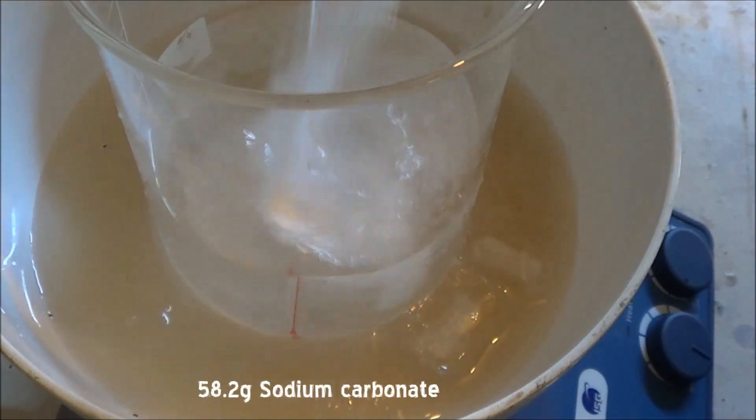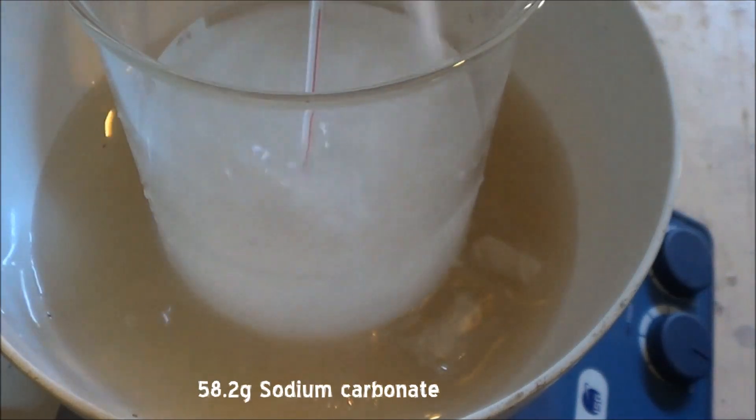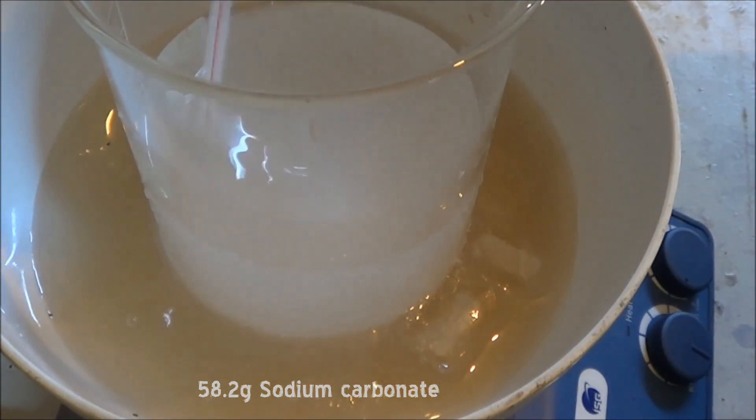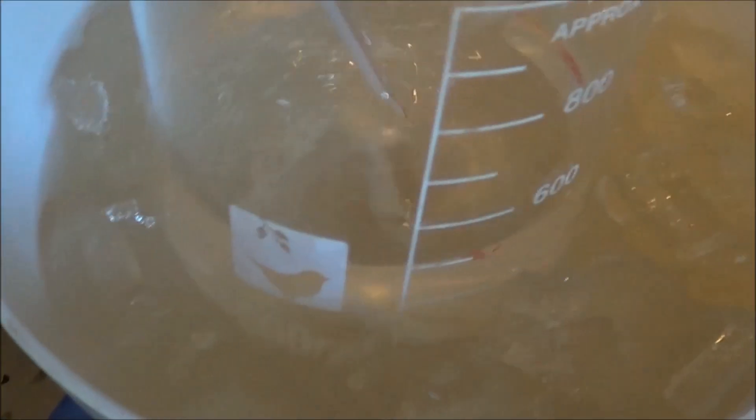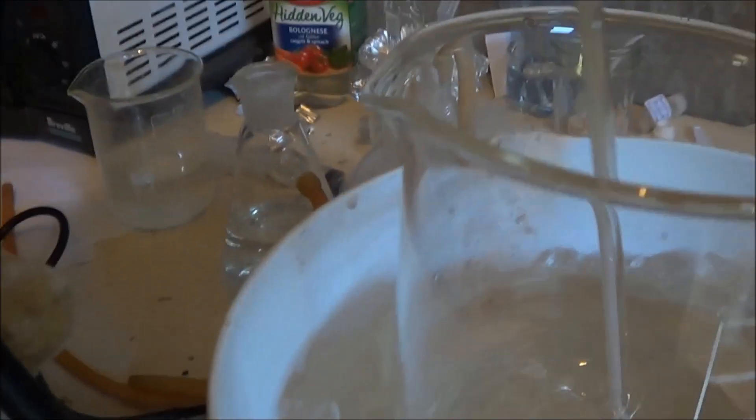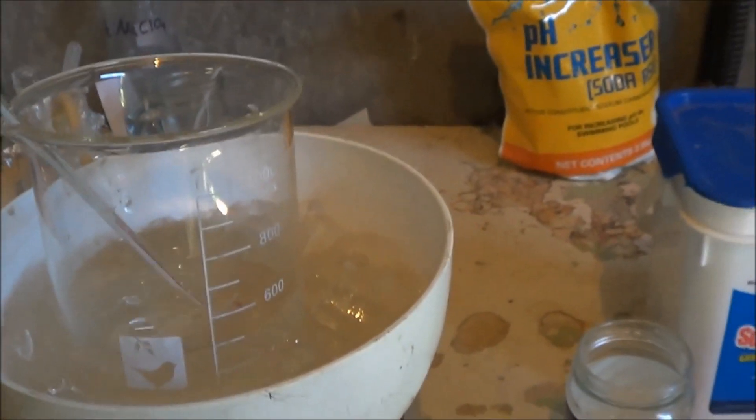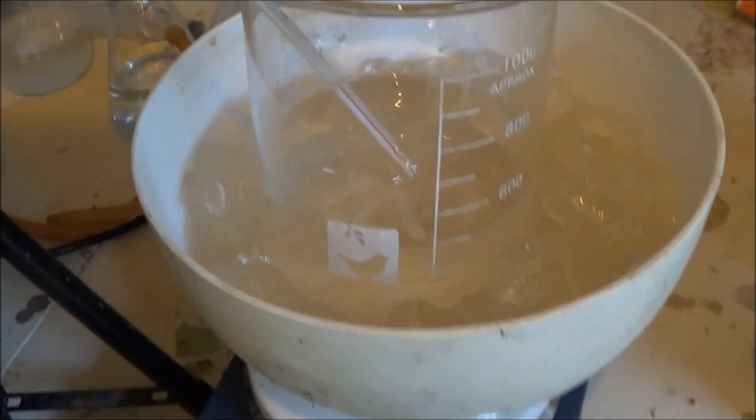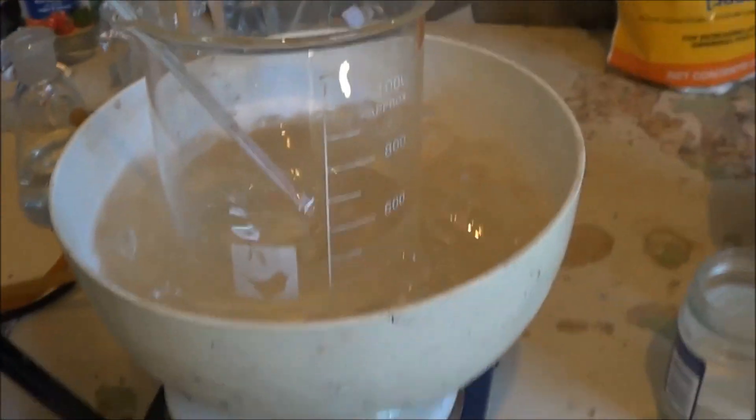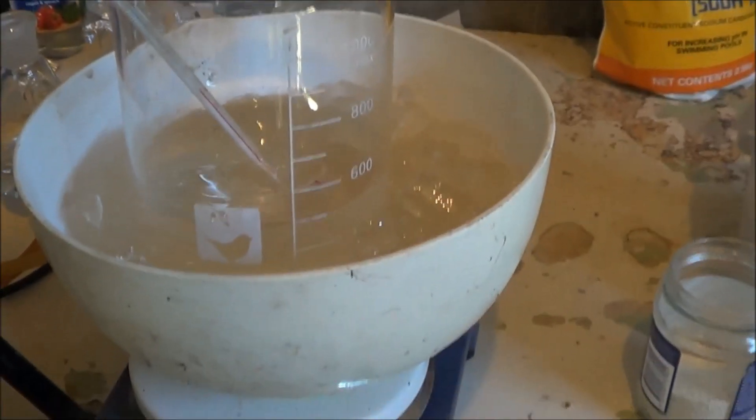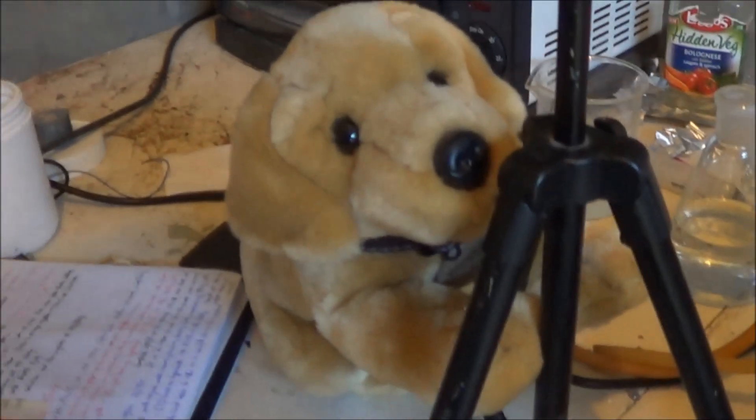I'll insert the carbonate. It's nearly all dissolved. And I've put a whole lot of more ice in our ice bath. We're about a couple degrees. The big issue we're finding today is it's actually a beautiful, sunny Australian day. So, it's like 35 degrees. So, it's really a terrible idea to be out trying to keep things cool on a day like today. But Monty suggested it.